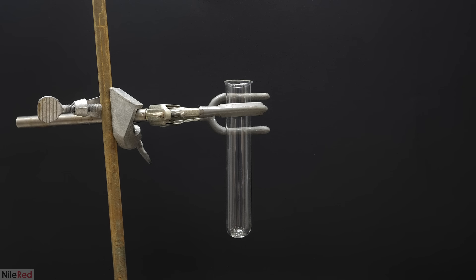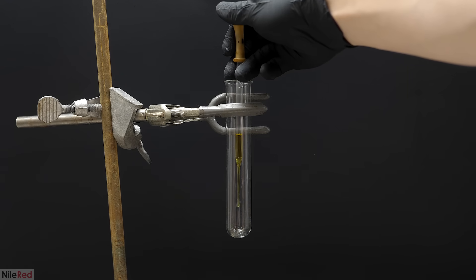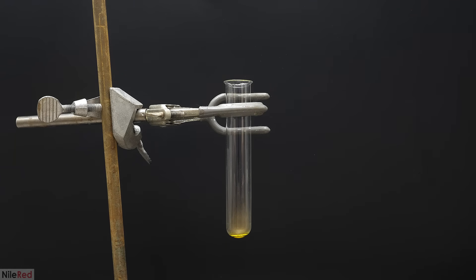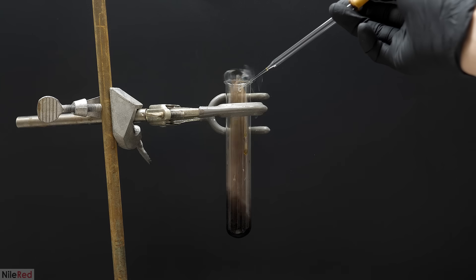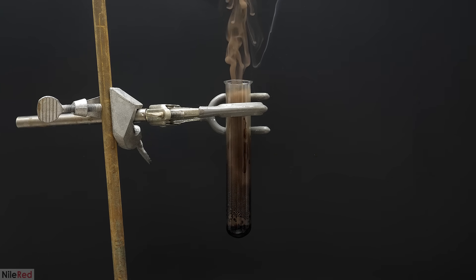So, as I said before, the setup is pretty simple. All I needed was a test tube, and a small amount of the nitric acid, and the aniline. I started by adding the nitric acid to the tube, and then I drop-wise added the aniline. There was a slight popping sound the moment it touched the acid, and it made me flinch a bit. It never ended up firing, but there was clearly a reaction going on that was causing the aniline and the nitric acid to boil.